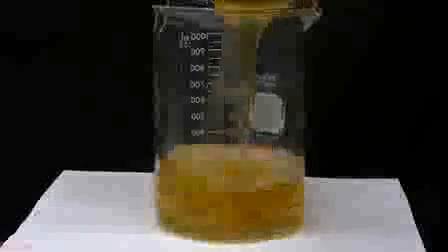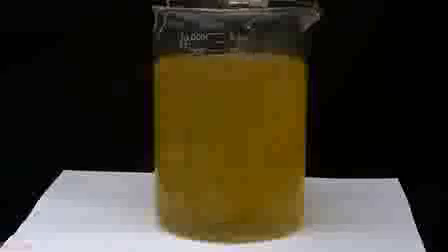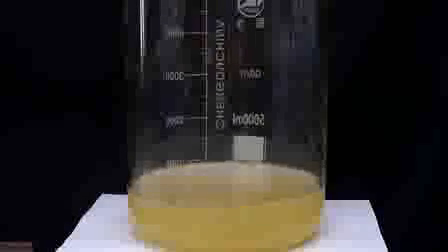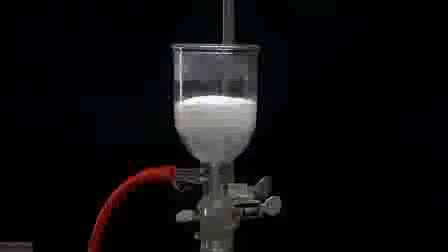I tried crashing it out with acetone in a 1 liter beaker, but it seemed like we needed a lot more acetone. It does get cloudy, indicating that crystals are falling out, but it still really isn't enough. I transfer everything to my 5 liter beaker, and then I waste a huge amount of acetone to crash everything out. After adding the acetone, I wait a little bit, and when I come back, there's a lot of crystals at the bottom. Most of the liquid is decanted off, and the rest is transferred to a 1 liter beaker and then filtered. I go on to wash it just like before, where I use methanol, followed by a little bit of dichloromethane.